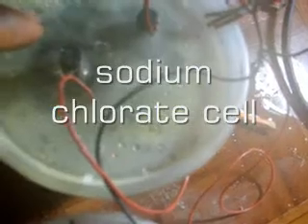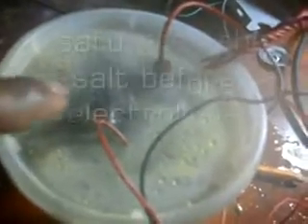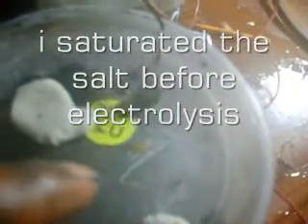Right here is my sodium chlorate cell and my potassium chlorate cell. I'm currently using carbon rods as my anode and my cathode, and it smells like chlorine — same thing with the other one. For this one I use household salt, and for this one I use potassium chloride — the no-sodium type salt.